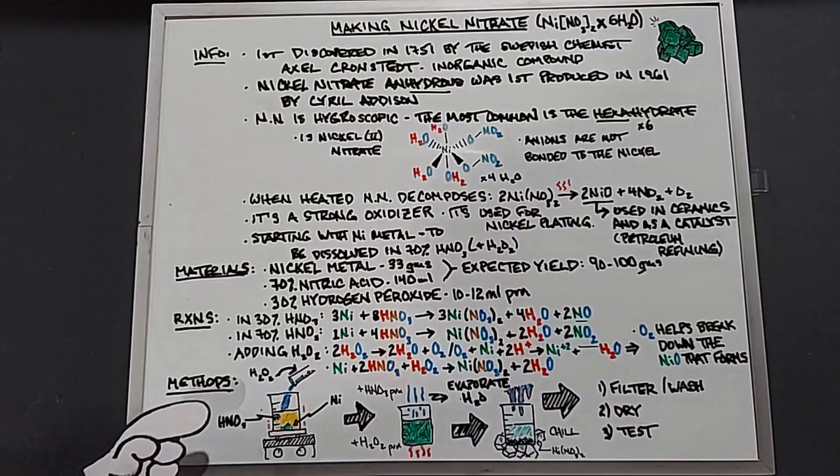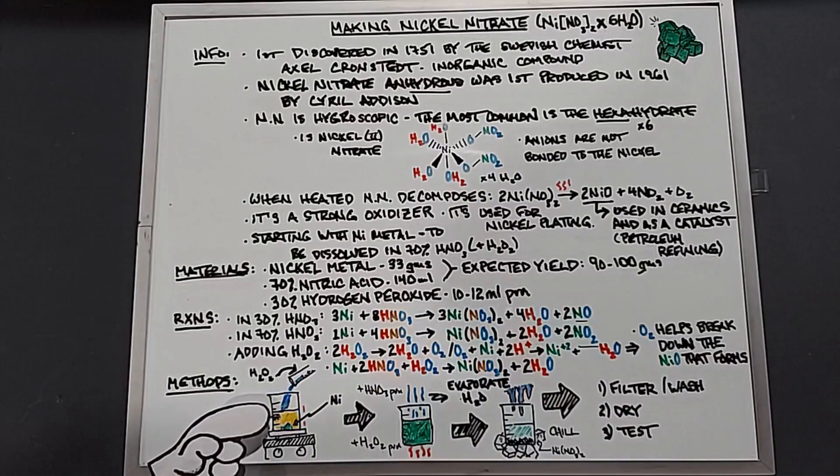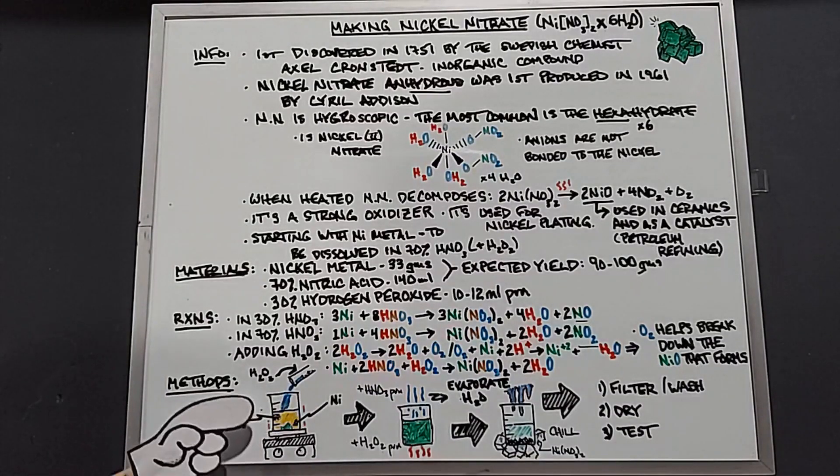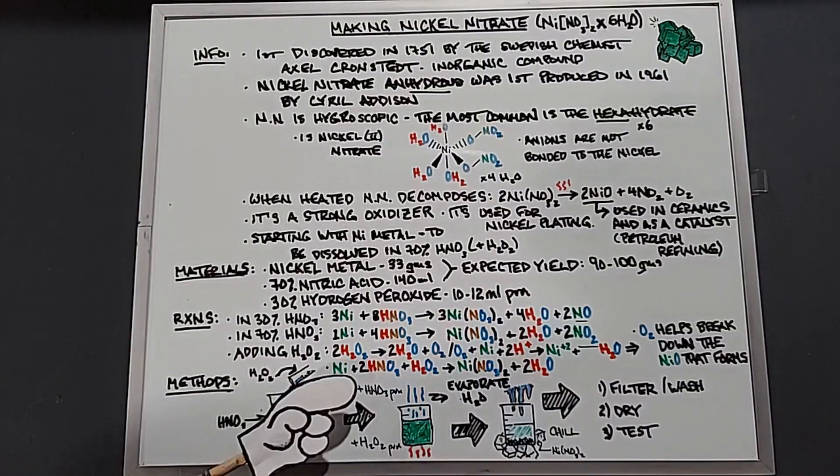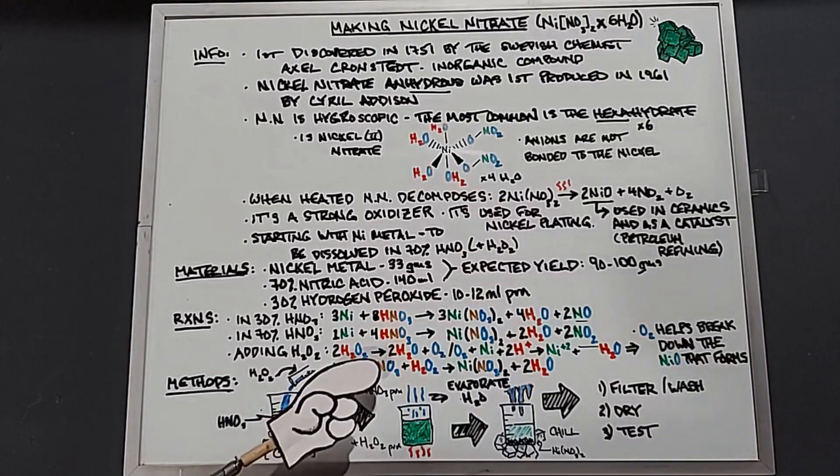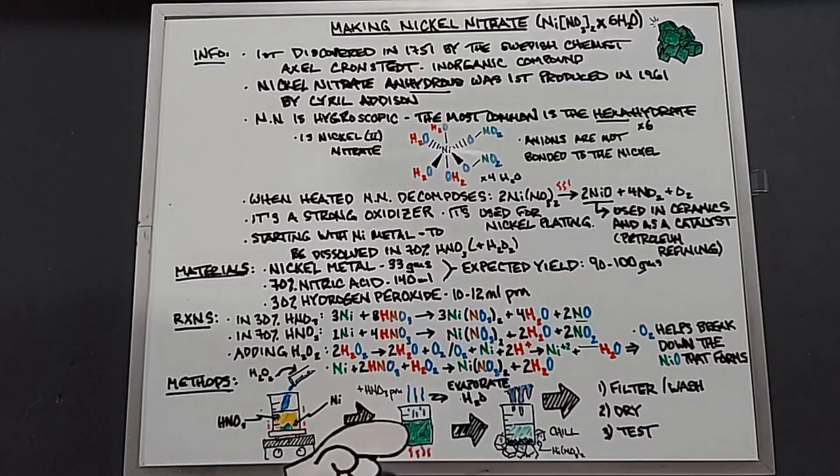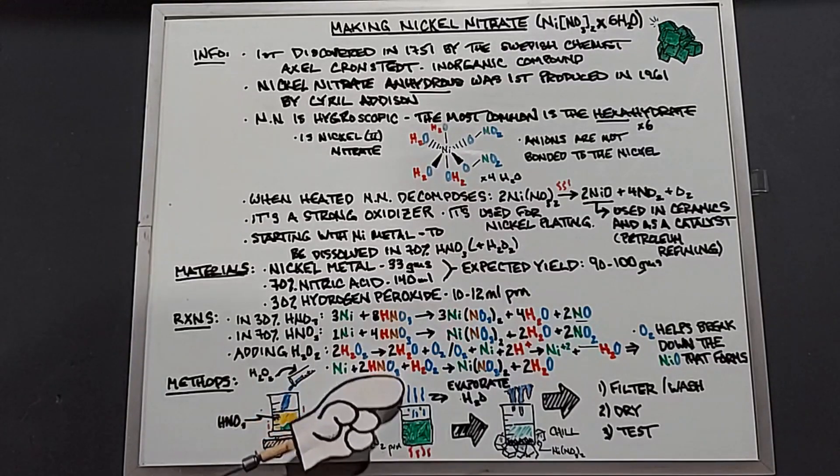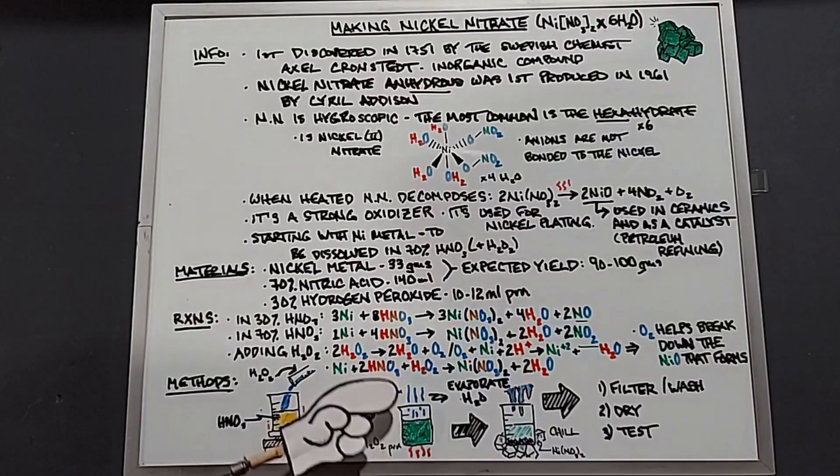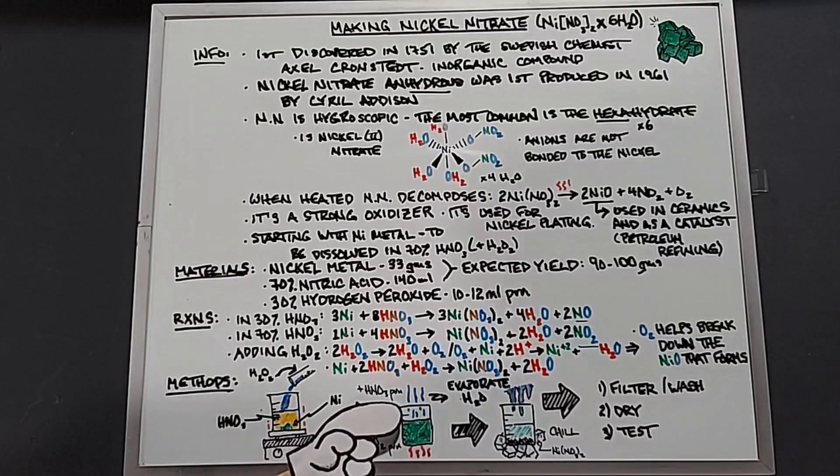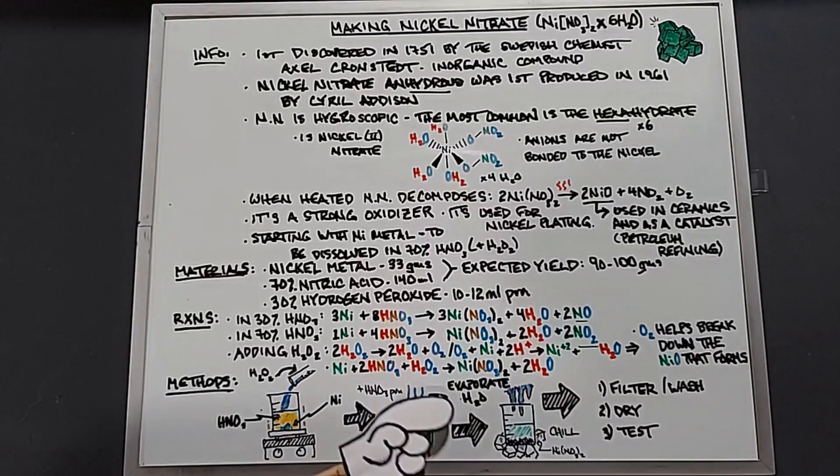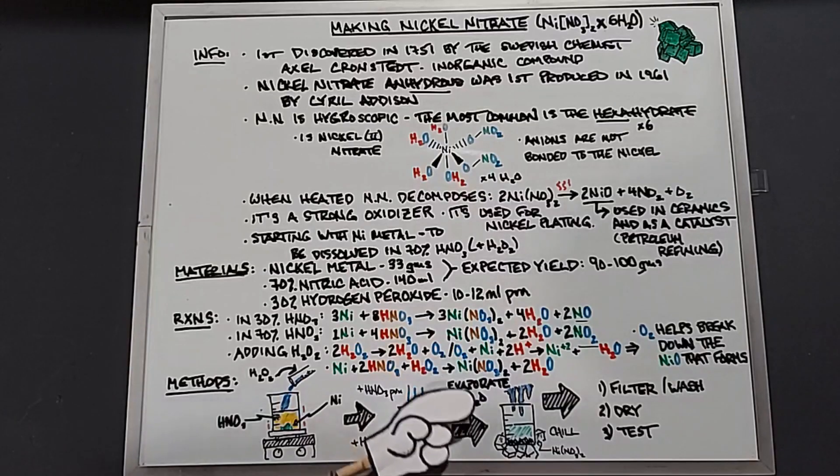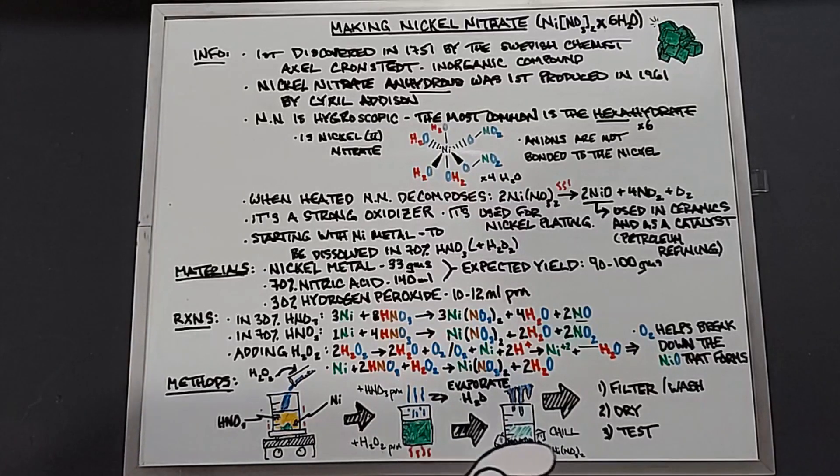In our methods, we're going to start with a beaker with 70% nitric acid and nickel metal. Adding hydrogen peroxide will be done as needed to get the nickel dissolved. Once that's done, I'm going to heat it to get rid of some of the water because we're using 30% hydrogen peroxide, which is 70% water, and 70% nitric acid, which is 30% water, plus we're producing water in the actual reaction itself. Once as much water is going to evaporate as necessary, we're going to cool it, which will bring out the nickel nitrate hexahydrate into its crystallized form.